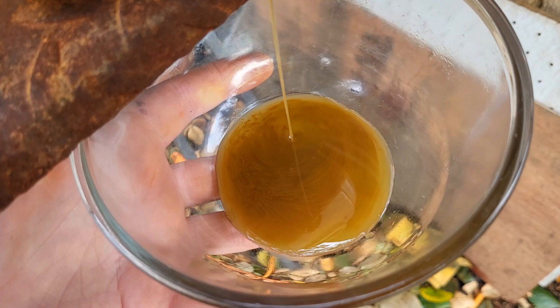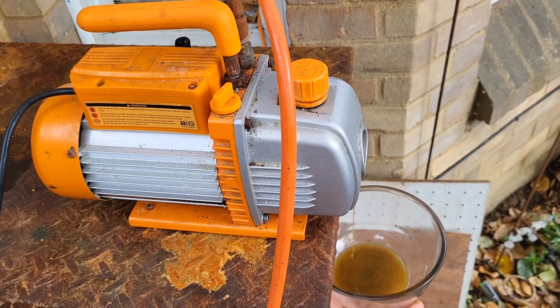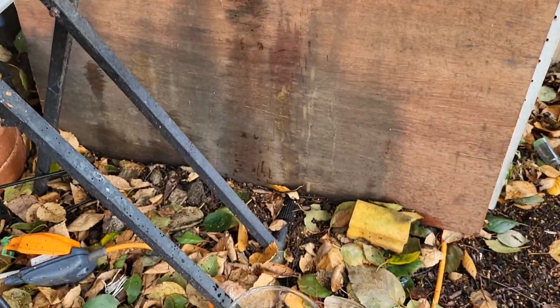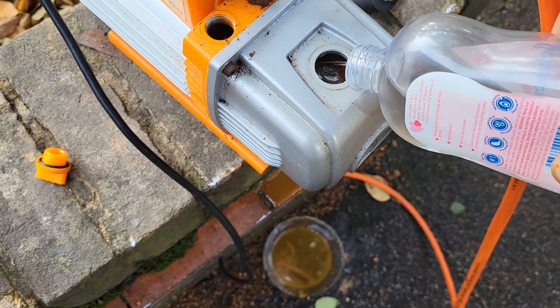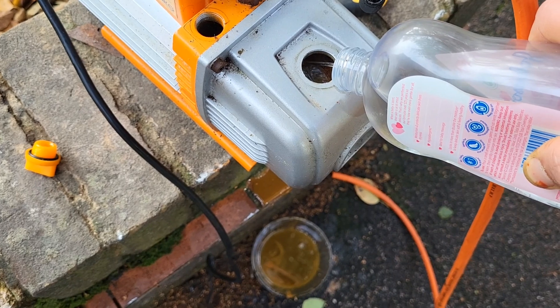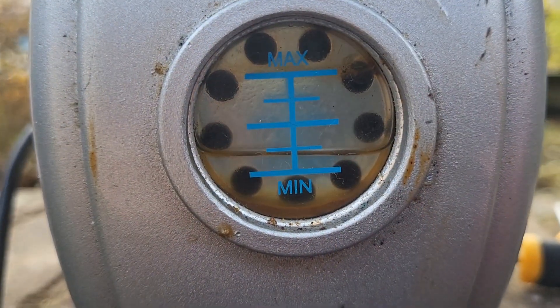Look at that disgusting oil — draining my vacuum pump to change the oil. We've got Johnson's Baby Oil, which is primarily mineral oil. That's all the oil I have, but it's enough.